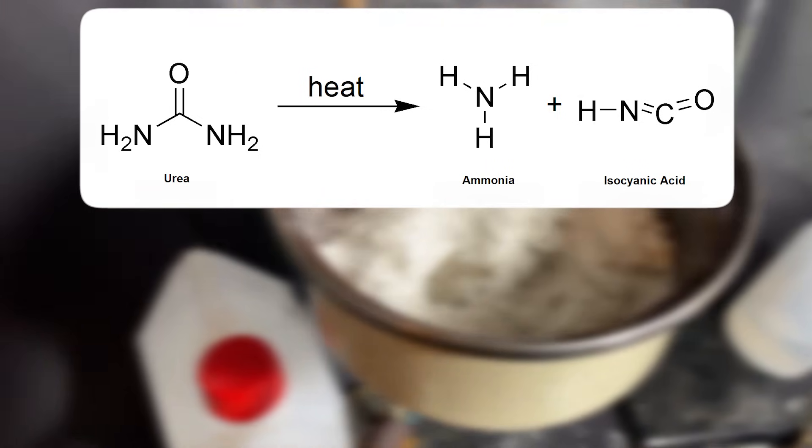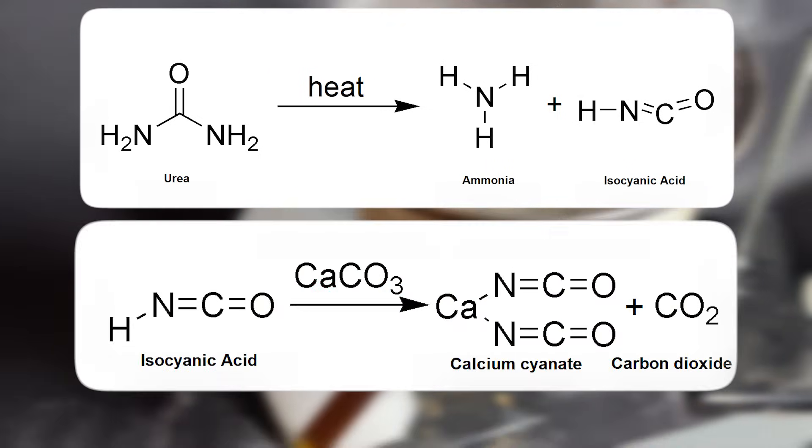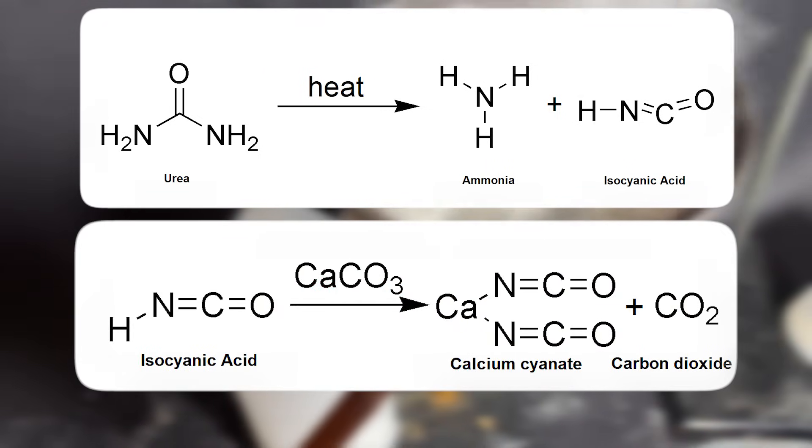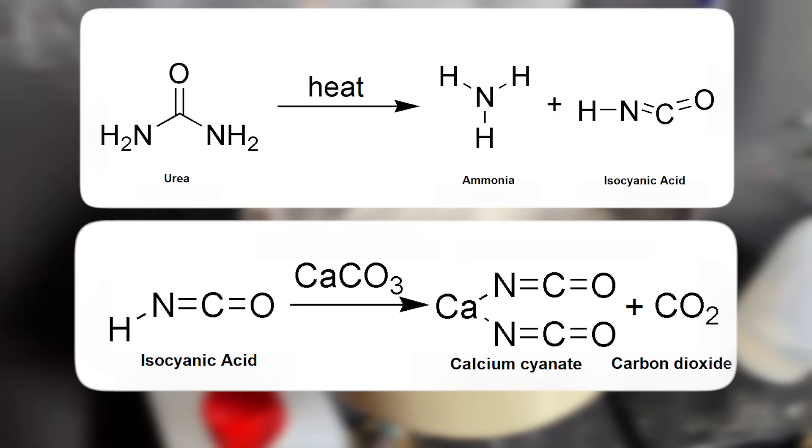Under heat, the urea decomposes into ammonia and isocyanic acid. Then, this isocyanic acid reacts with the calcium carbonate to form calcium cyanate in an acid-base reaction.